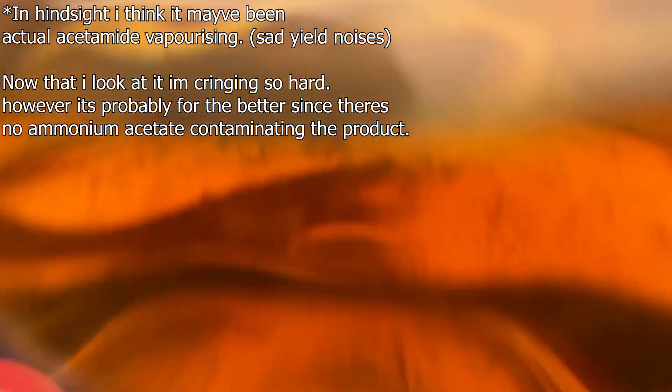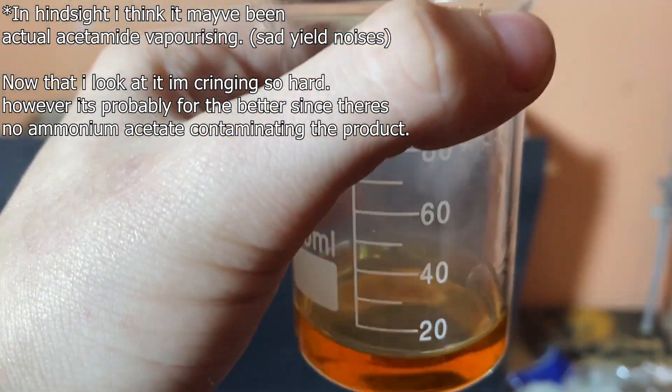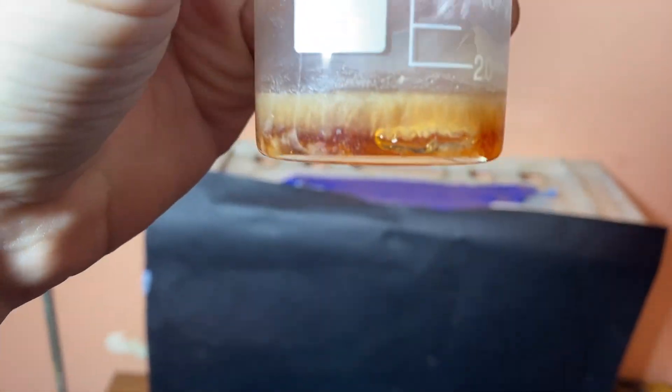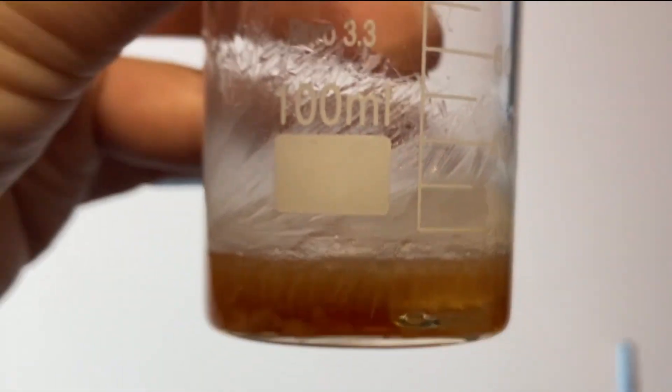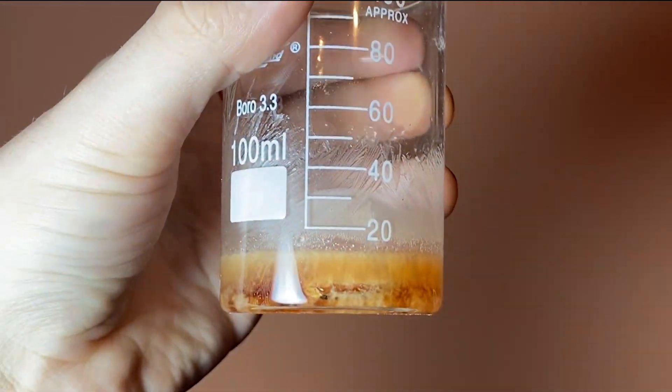Acetamide generally has a problem with crystallizing, so I've waited quite a long time. Eventually I was met by a really interesting sight, which is the acetamide crystals crystallizing from the top and it was actually really cool to see.